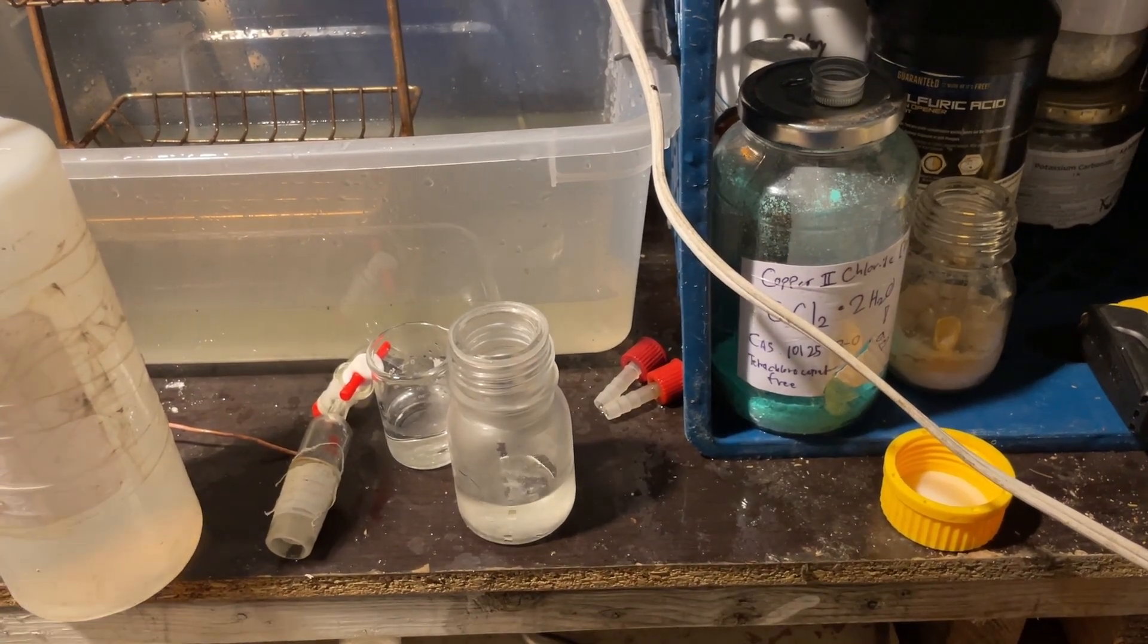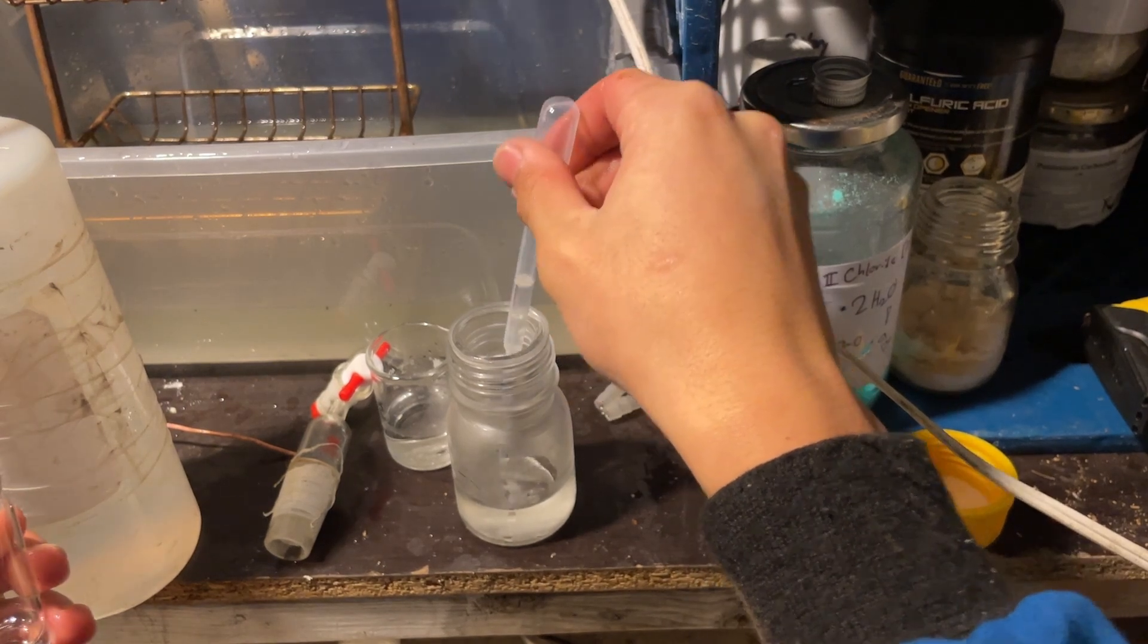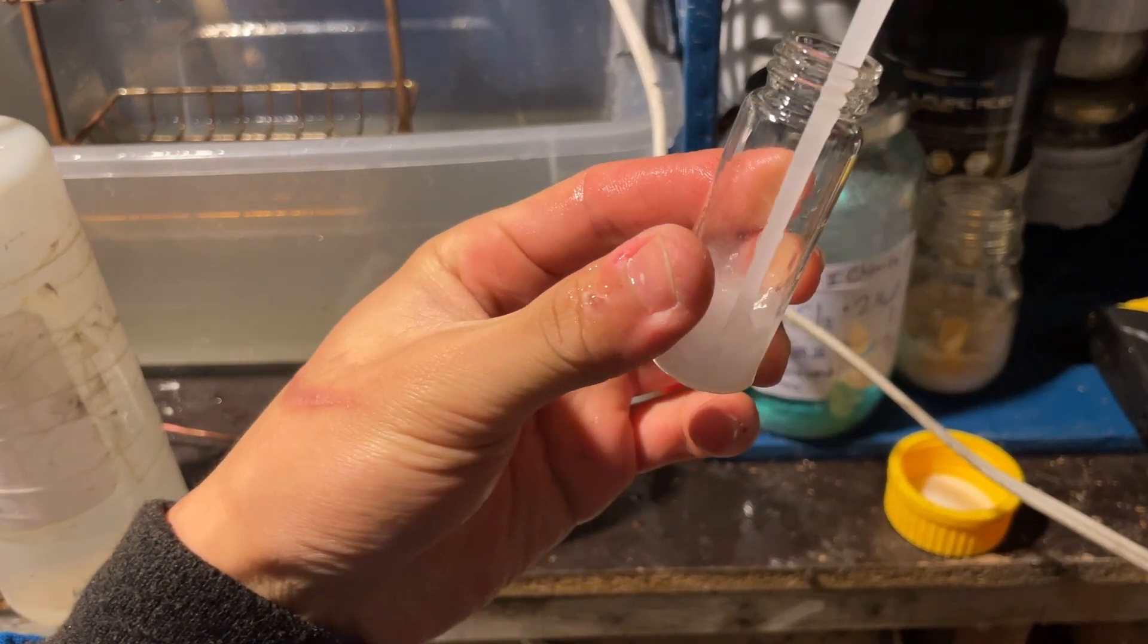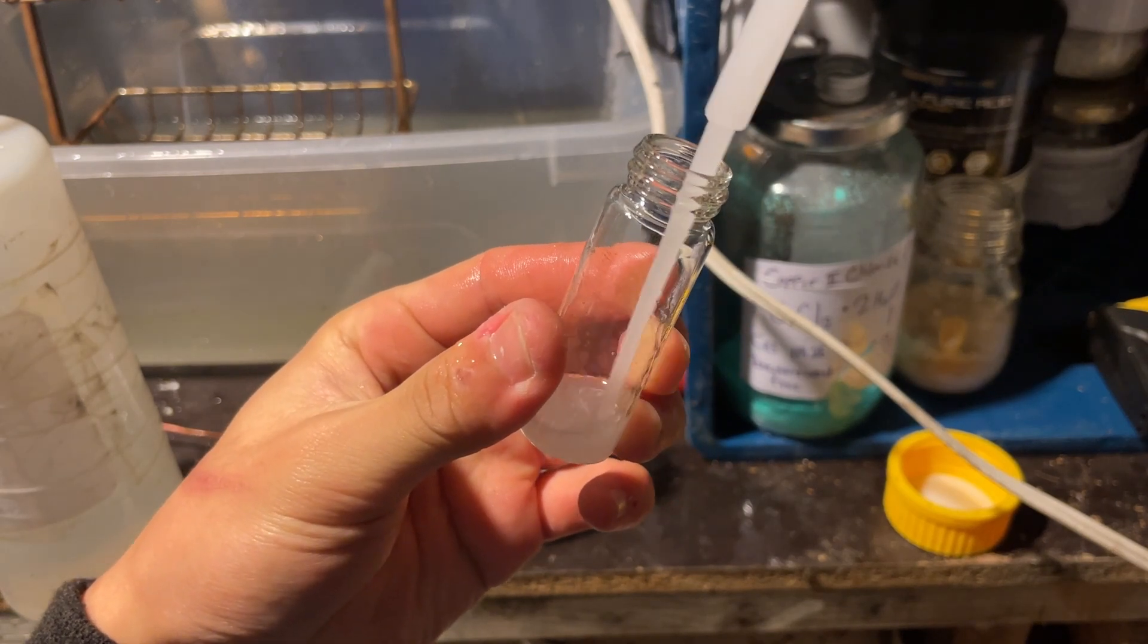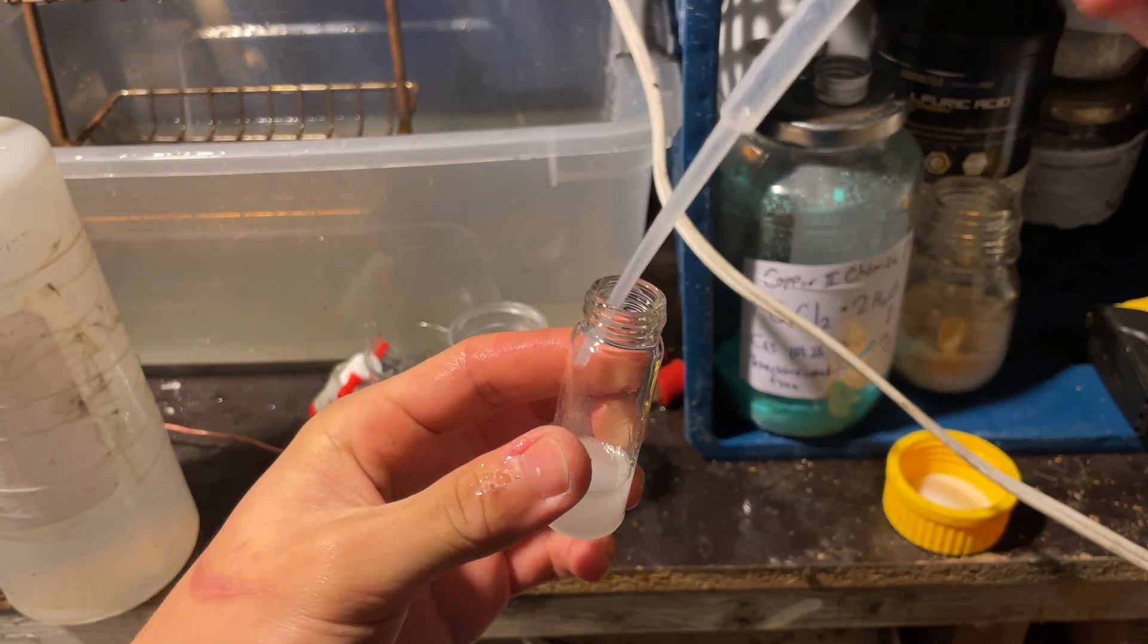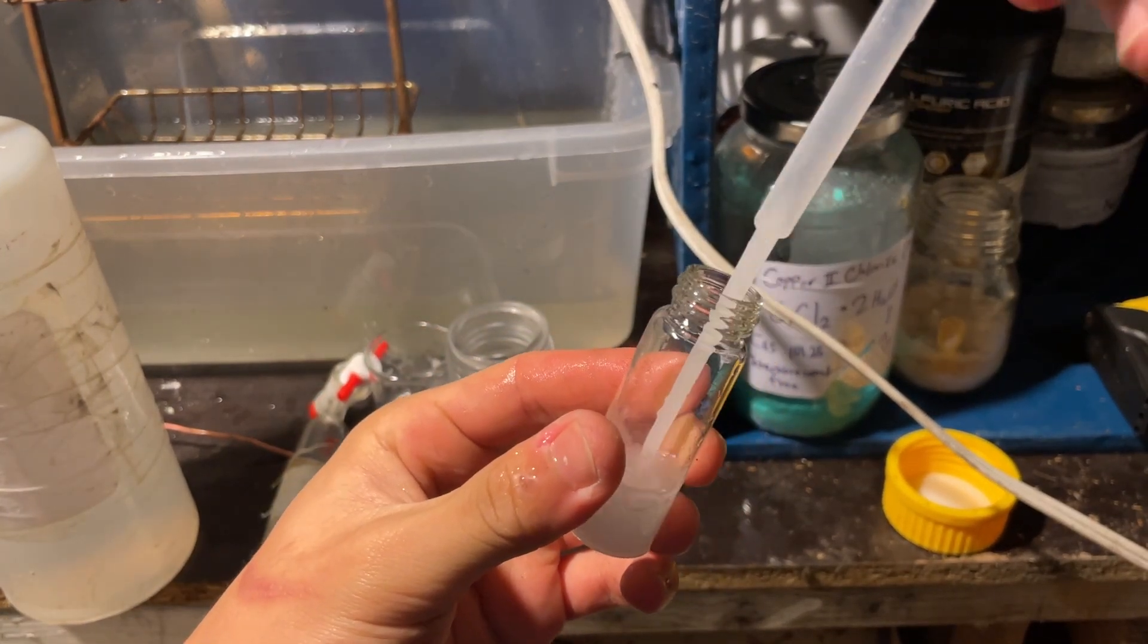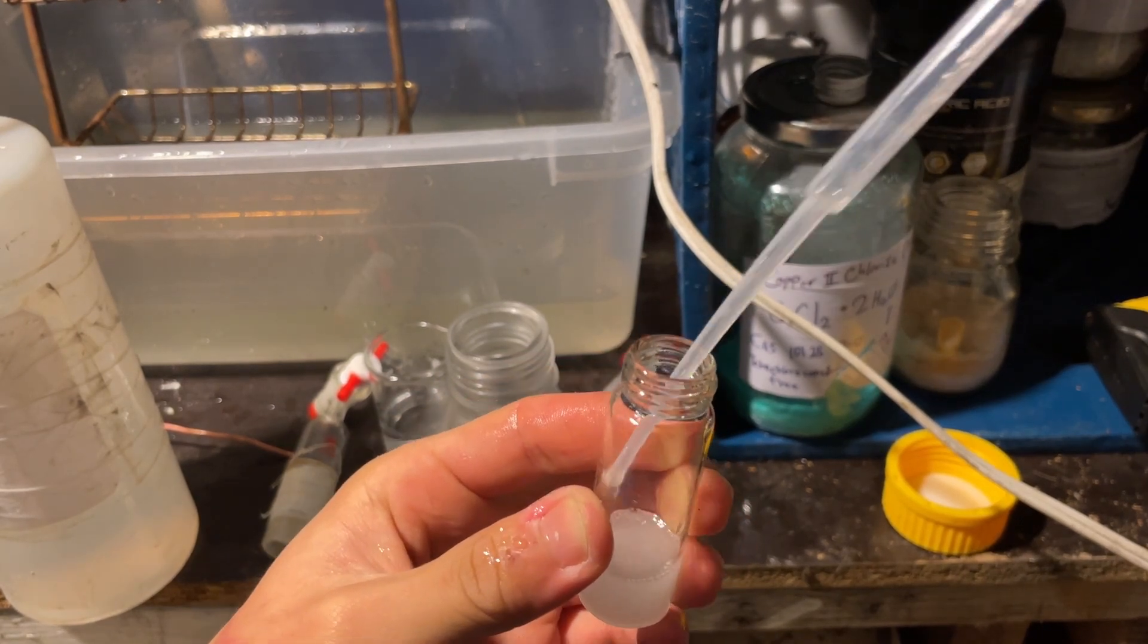So, there's definitely HCl dissolved, which I believe it should be fixed if you use the calcium oxide to neutralize it. So, now, if I add it into the water, and I mix it, you can see it's not immediately miscible. And, smell check again. Still smells like what it smelled like. So, we'll get this mixed thoroughly, and I'm just gonna leave it for a while.